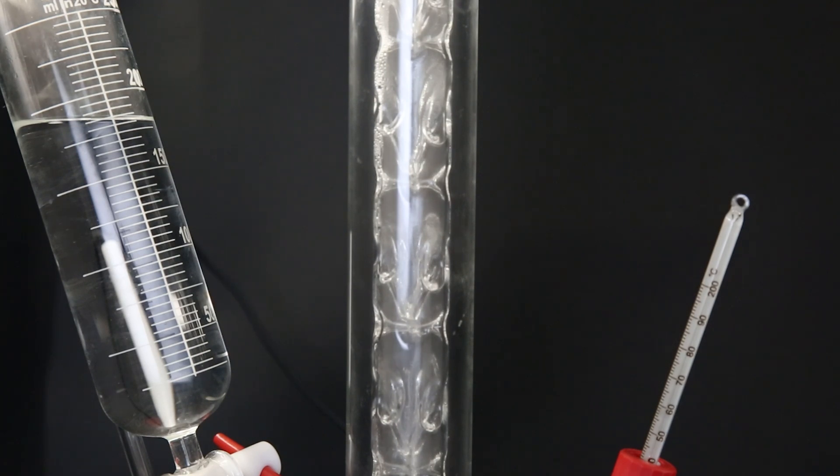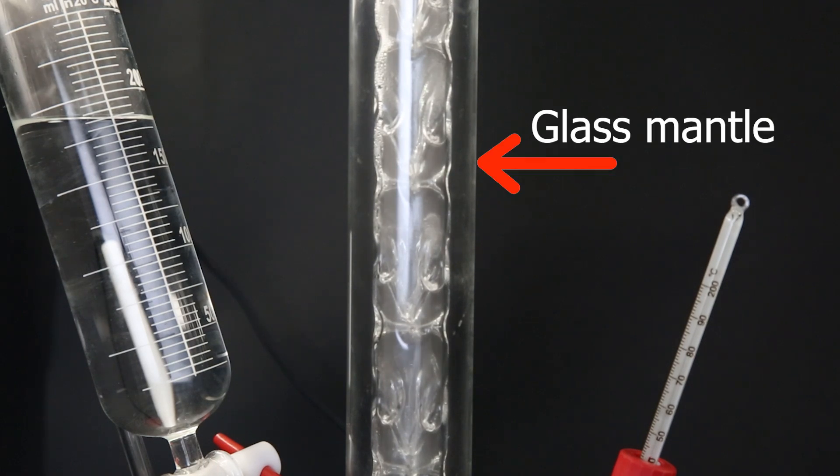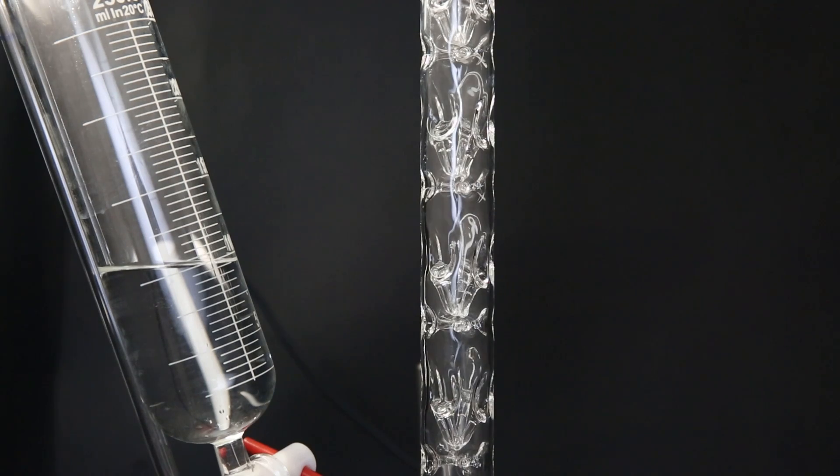Instead, I will try to cool down the column. The first thing I did was removing the glass mantle around it. This should allow the air to cool things down, but unfortunately it wasn't very effective and the temperature stayed the same.